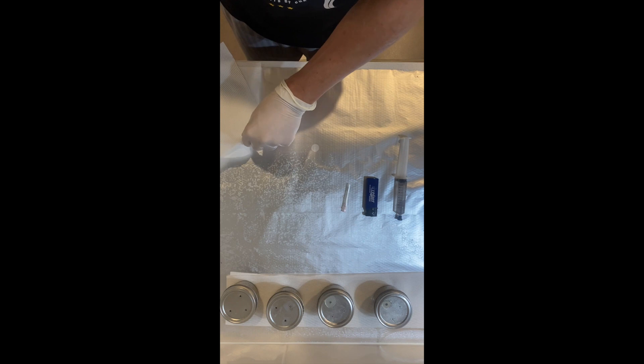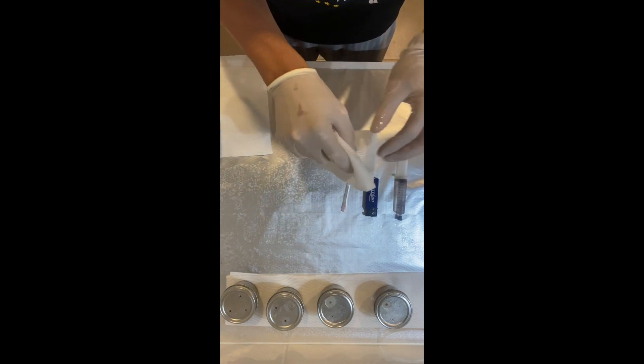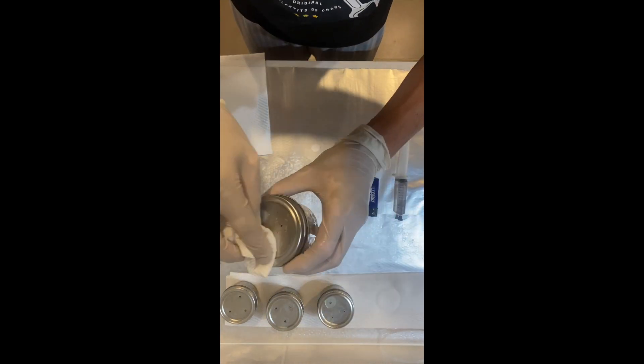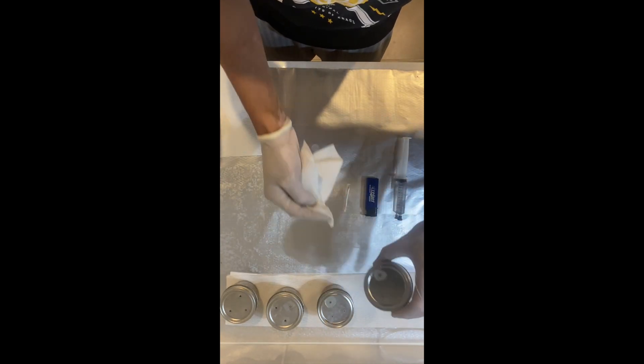Now we are ready to get another paper towel, give them a light squirt with our alcohol again, just going to lightly wipe down where we're going to be injecting, so just over those holes.